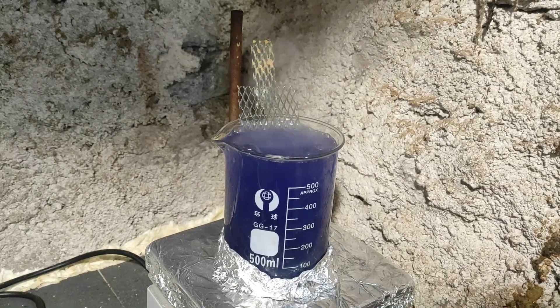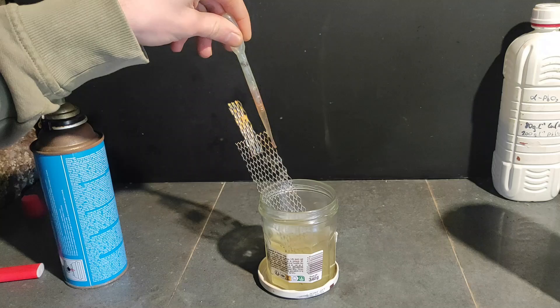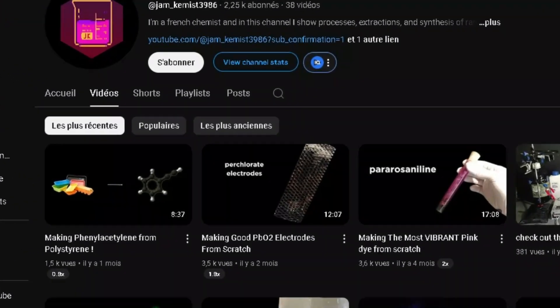Another detail is that when you have finished etching the titanium, you should apply the ATO precoating very fast, otherwise the titanium will again start to oxidize in the air into titanium dioxide. If you don't know what an ATO coating is, don't worry because I will explain it later in the video, or you can also watch the first video on this whole process.